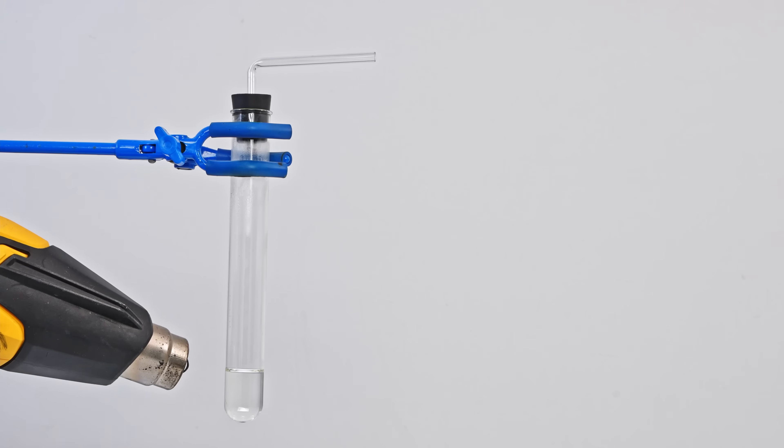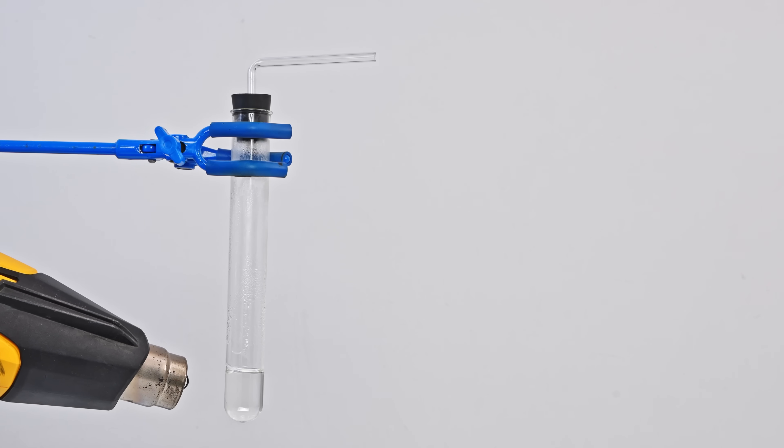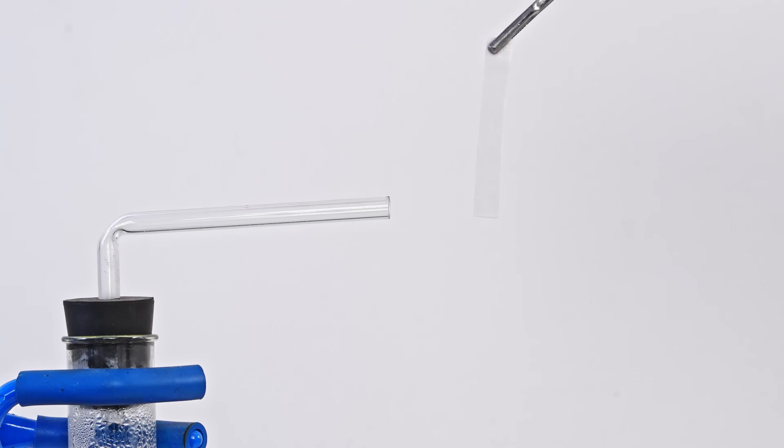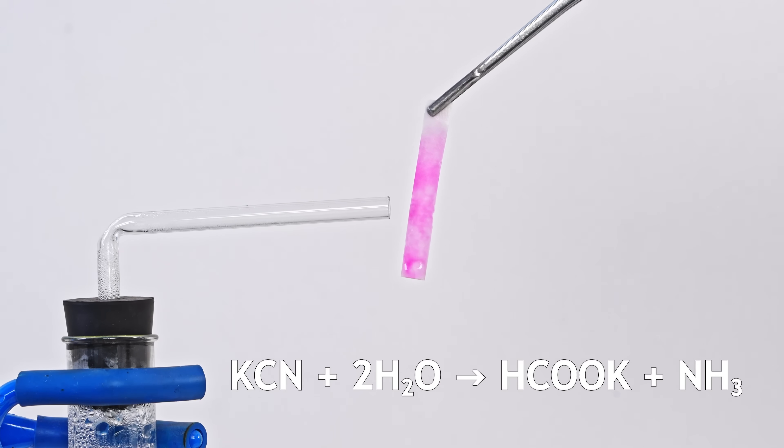When heated, a solution of potassium cyanide releases ammonia, which can be detected by bringing a piece of paper soaked in phenolphthalein into contact with the gas. Also, a solution of potassium cyanide decolorizes an acidified solution of potassium permanganate.